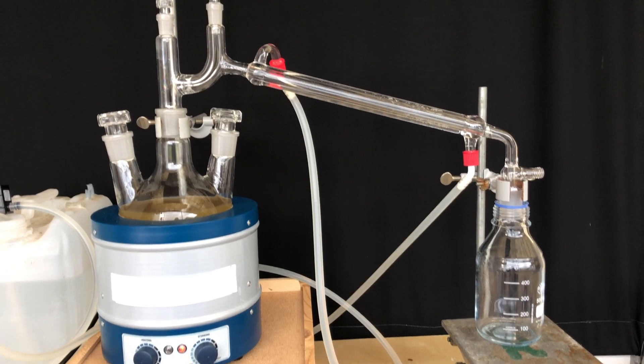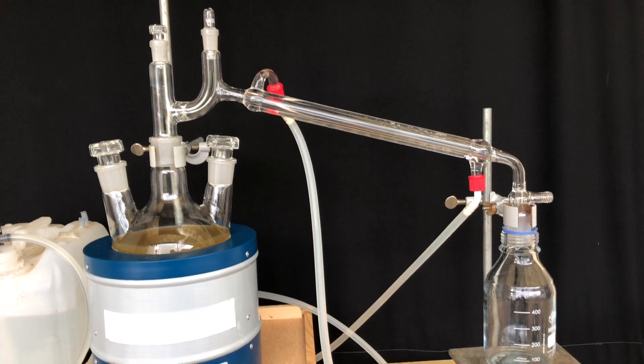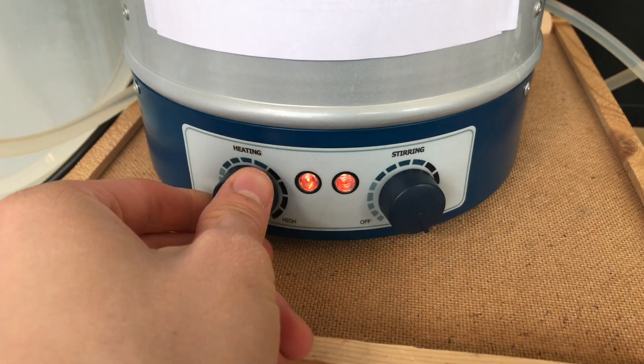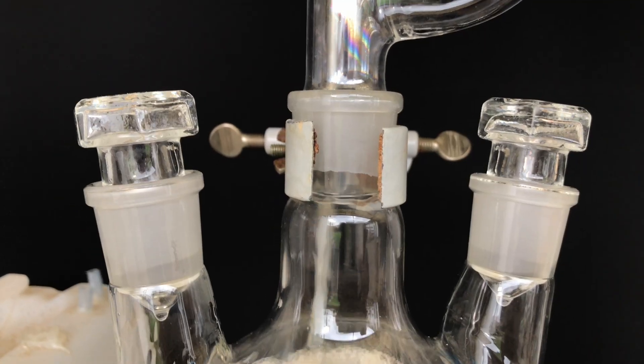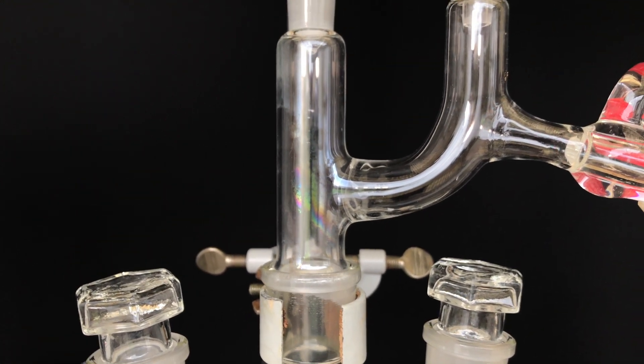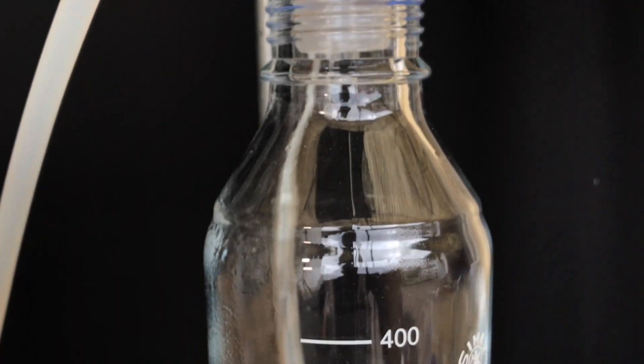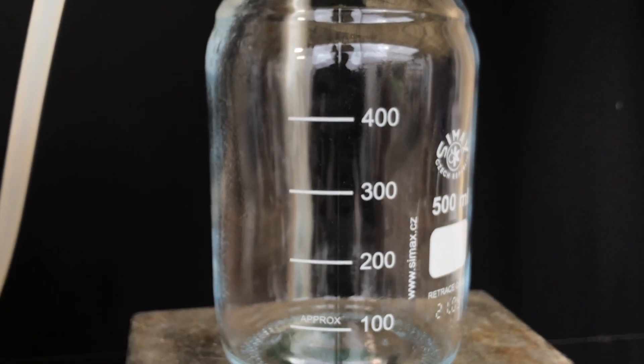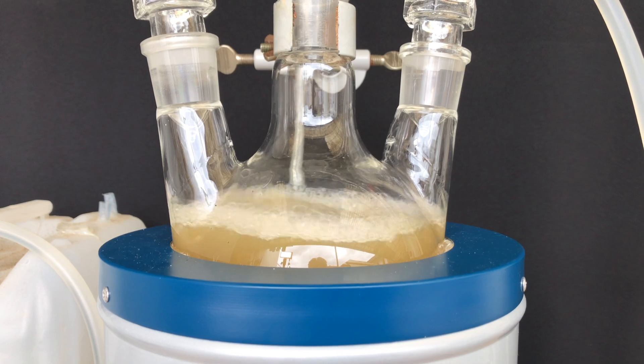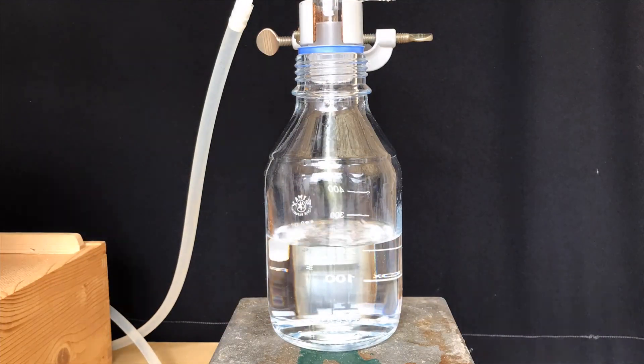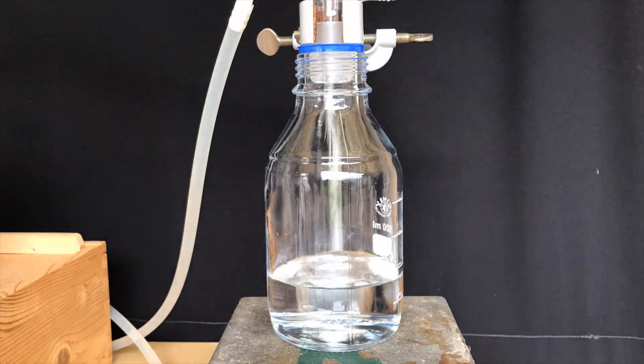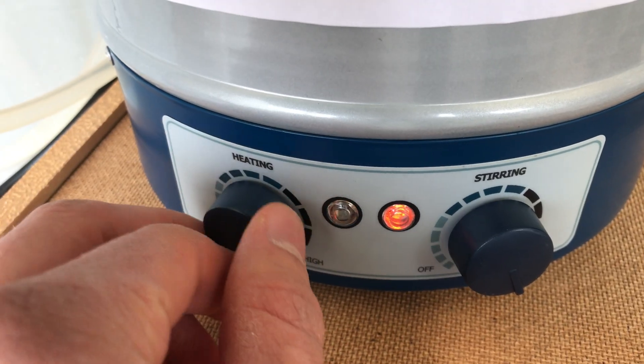Now there is a hydrocarbon solution of alkaloids, nasty contamination, and a touch of ammonia. To continue, about 80% of the solvent were removed using a simple distillation. I always love watching the vapor front climbing up the glass. The entire distillation took only an hour, recovered solvent will be used for other projects, and the solution of alkaloids must now be handled with even greater care. Remember, this small amount of liquid contains the toxin of thousands of Datura seeds.